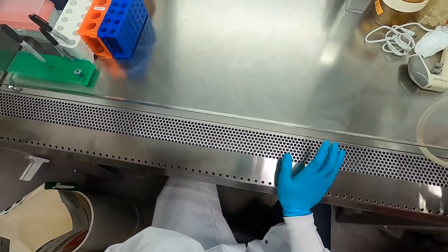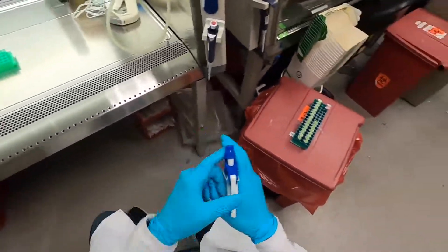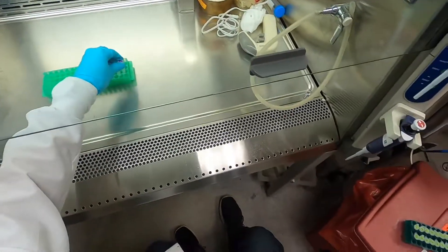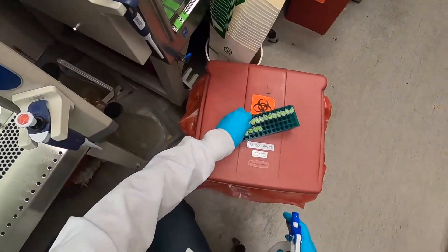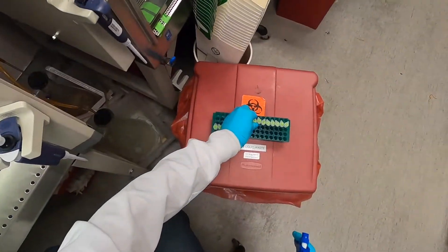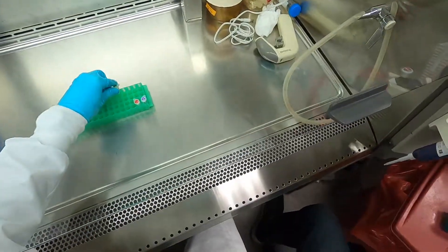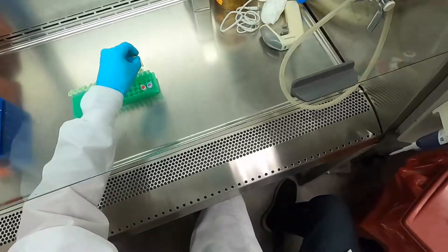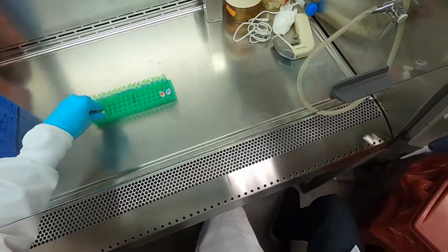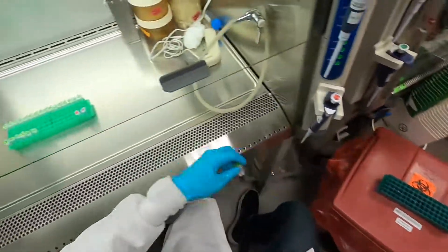We're going to be doing a transfection today. A transfection is a method for getting DNA into cells — a very broad, all-encompassing phrase. To be more specific, what I'm going to be doing today is transfecting plasmid DNA into HEK-293T cells to produce lentivirus, which I will harvest and use to transduce immune cells later this week. In these little Eppendorf tubes are my plasmid DNAs, which were isolated using a mini prep, and I'm spraying each tube with ethanol before bringing them into the hood.